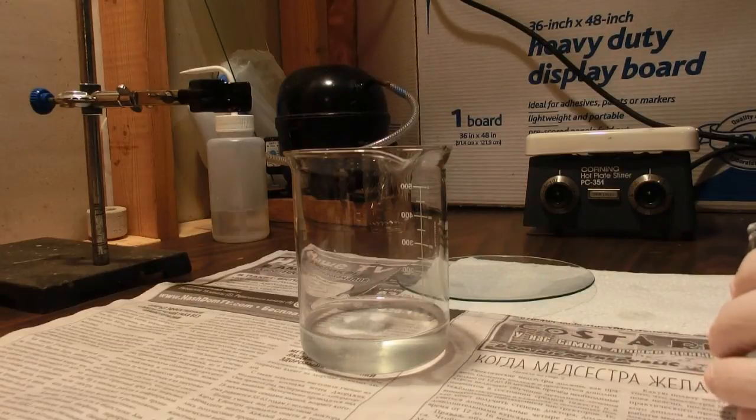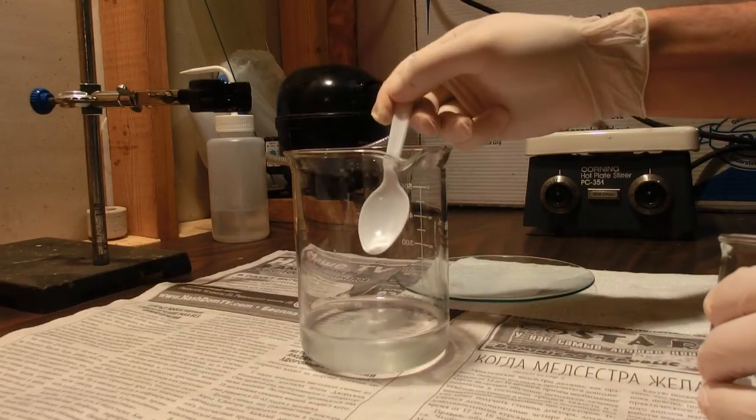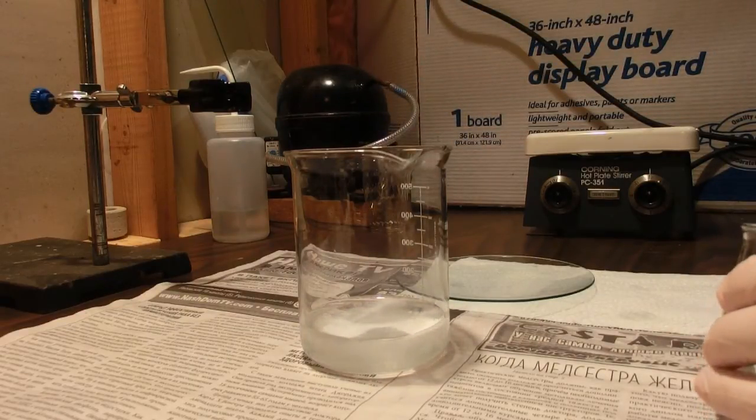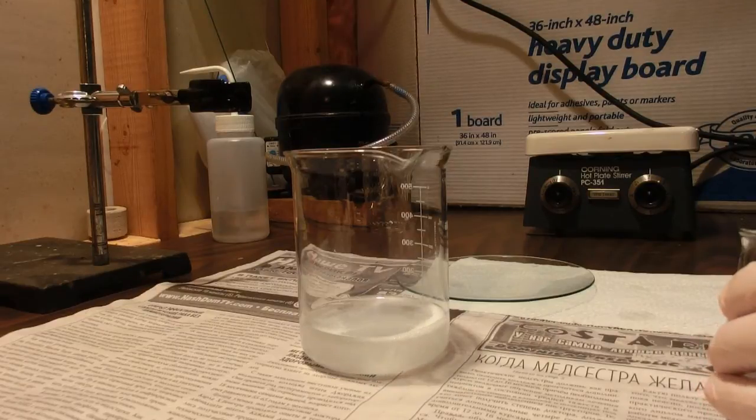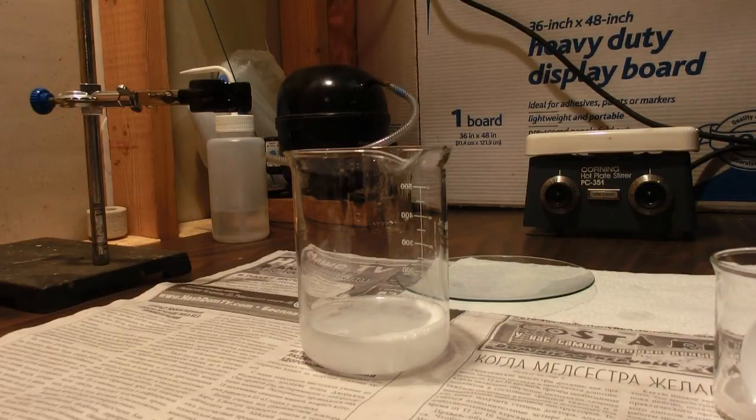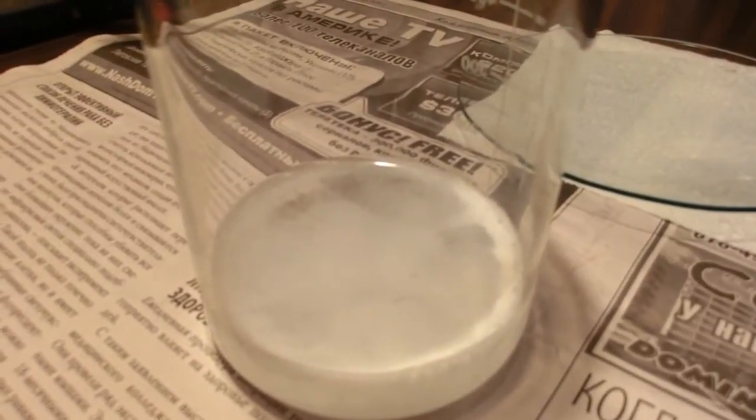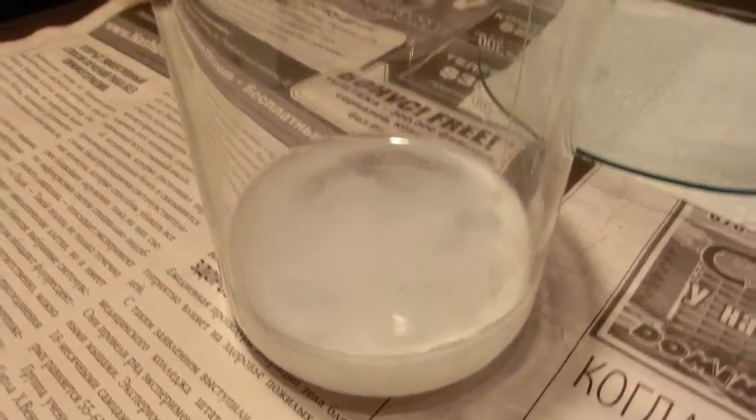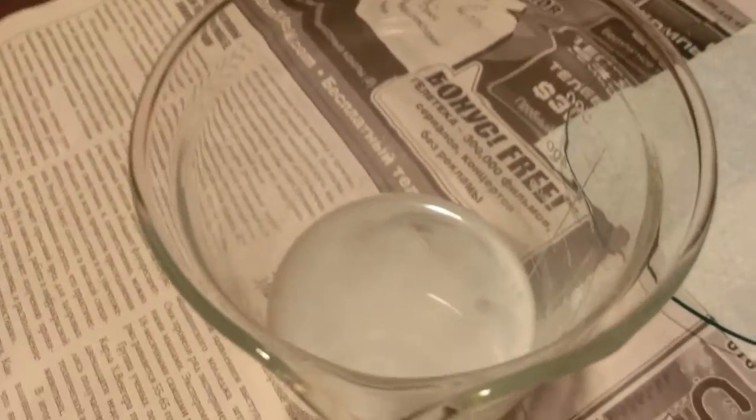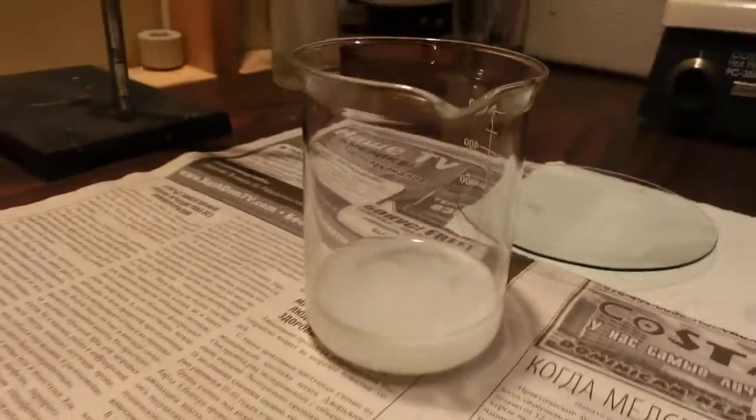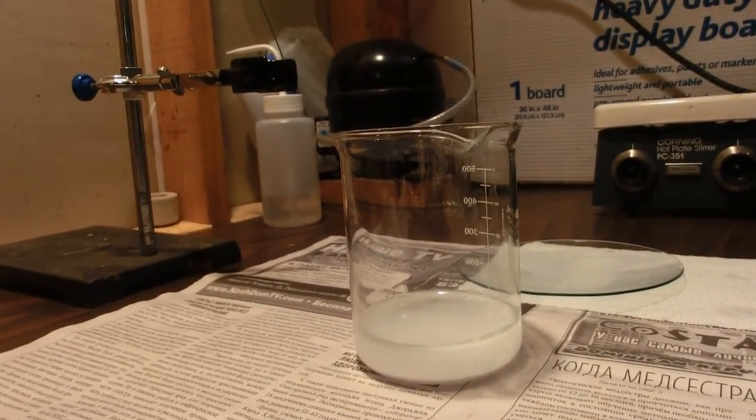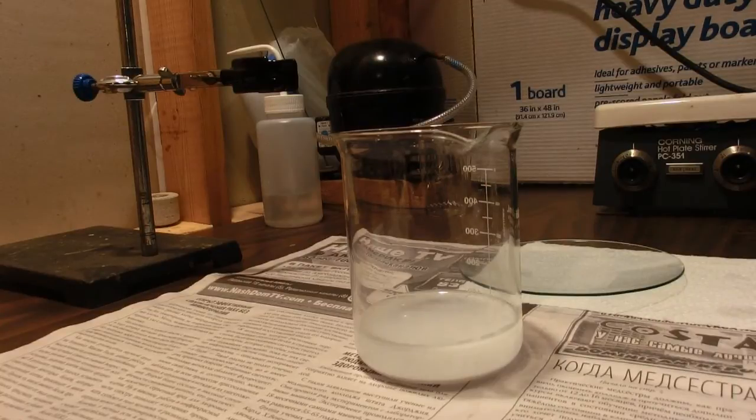Nope, there it goes. I don't know if you can see, but a white precipitate has already begun to form in the solution. So we'll keep adding this until we see no more bubbles.